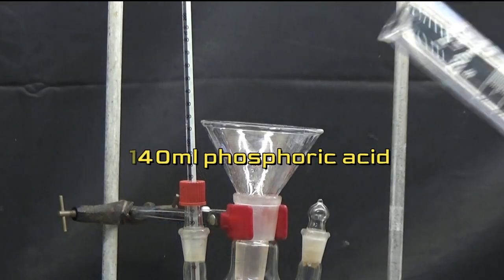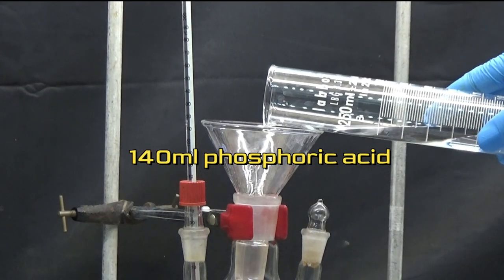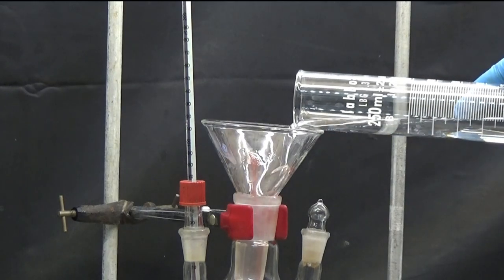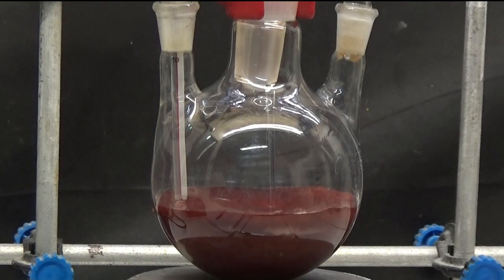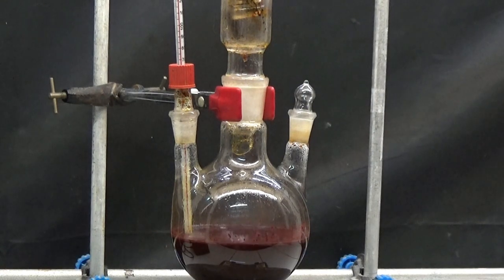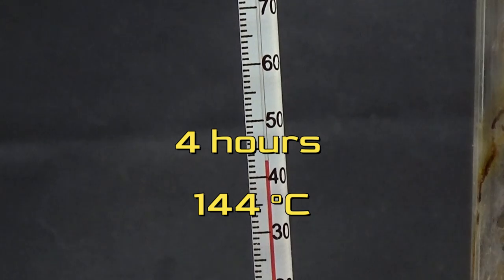Add 140 milliliters of phosphoric acid and fix the reflux condenser. 10 grams of potassium iodide. With moderate stirring, heat to 144 degrees during 4 hours.